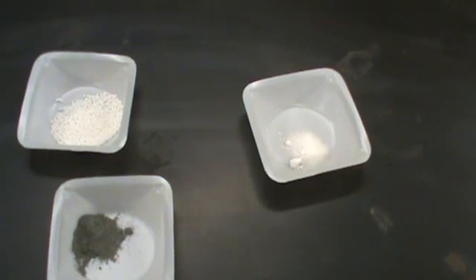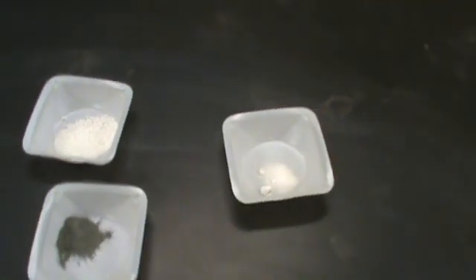So this is going to act as my catalyst actually. So what I'm going to do is I'm going to mix these three and then I'm going to add a couple drops of water and that's going to create the effect that I want for my firework.